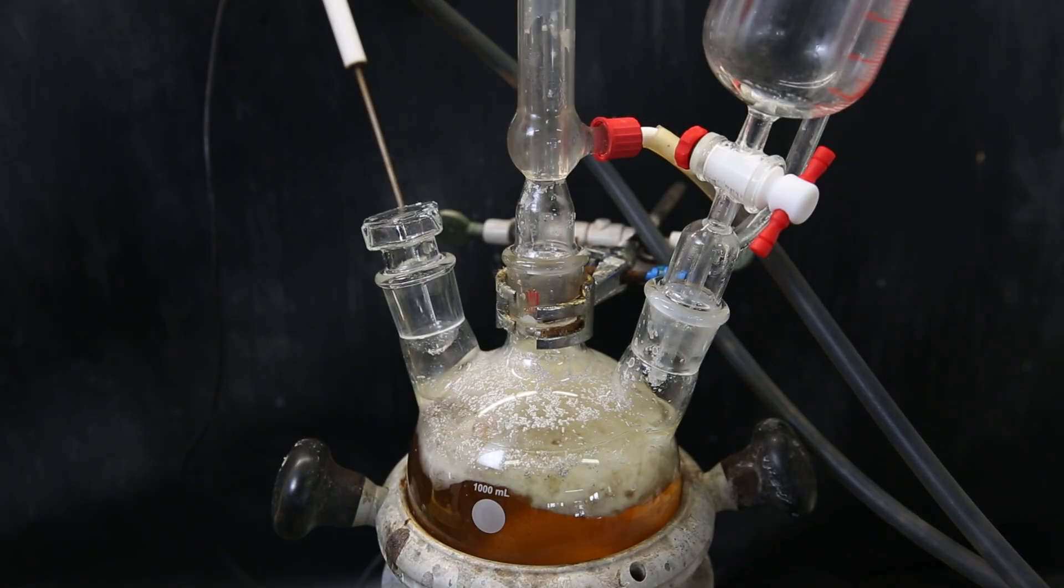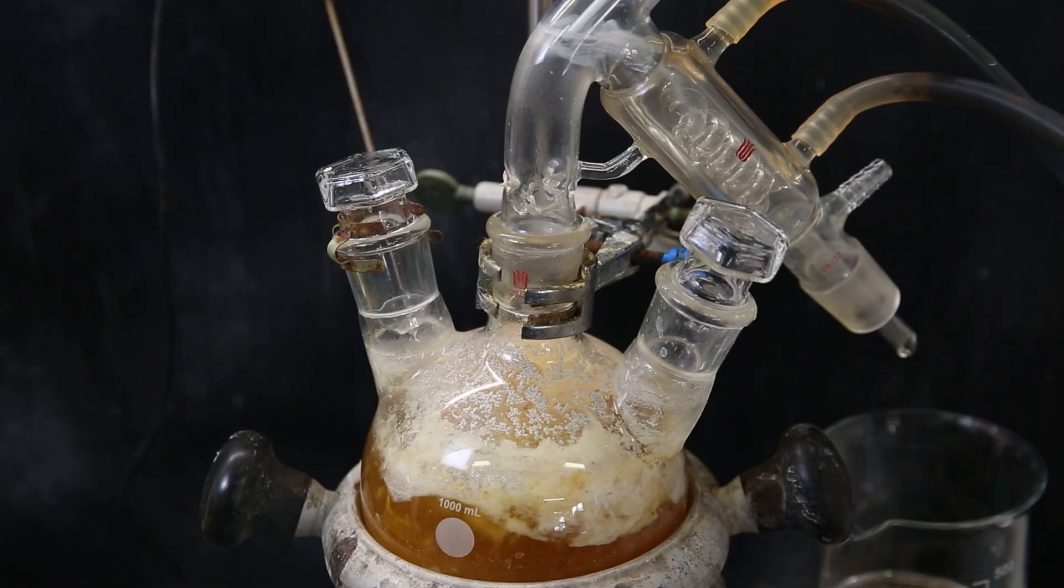When the addition was finished, I refluxed it for one more hour, and it is now an orange solution, with a bunch of solid product. Afterward, I set this mixture up for a regular short path distillation, to remove most of the THF, while leaving behind the toluene.